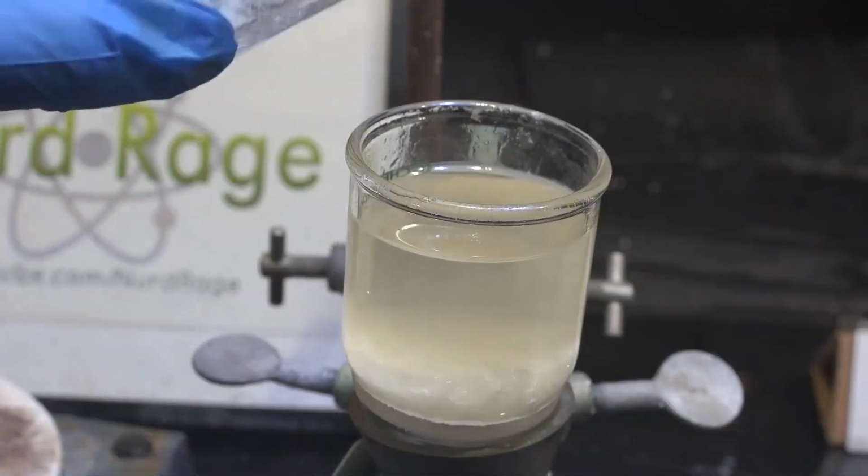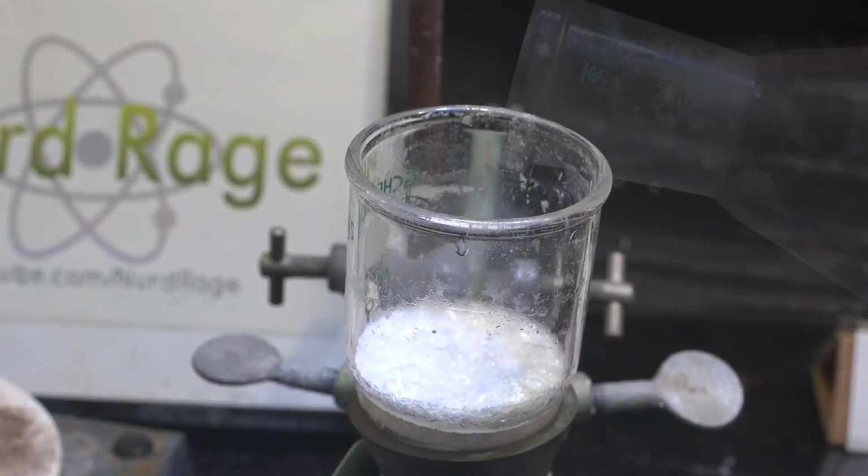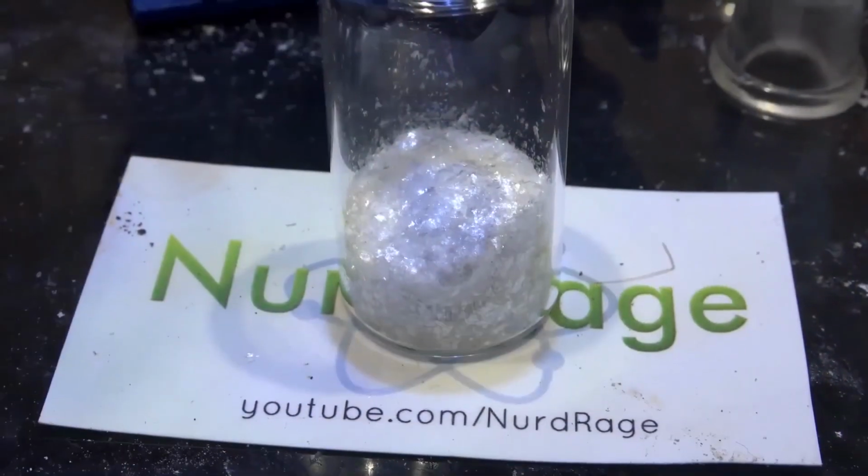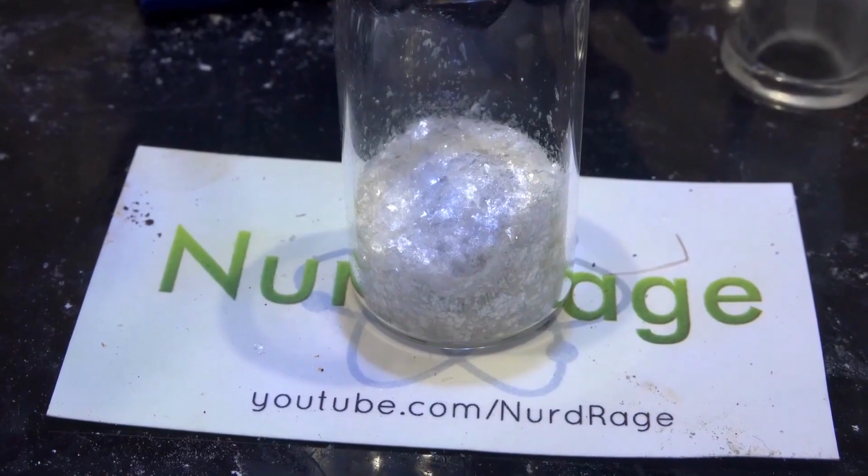And here we go. Now filter the crystals and wash them with some ethanol. Then wash them with diethyl ether. Now leave under the vacuum stream to dry. And there we have it, 2 years of work. Nonetheless, we finally have pyrimethamine.